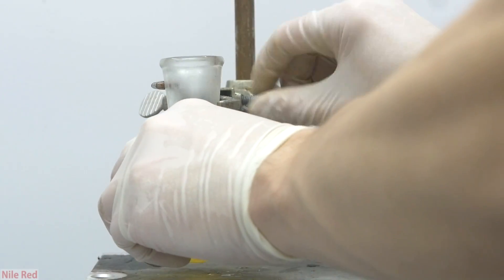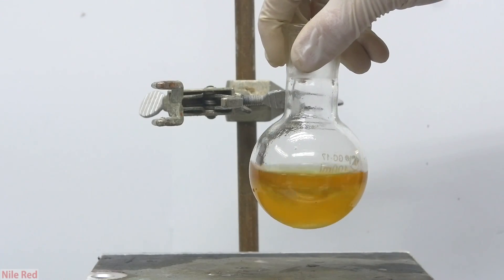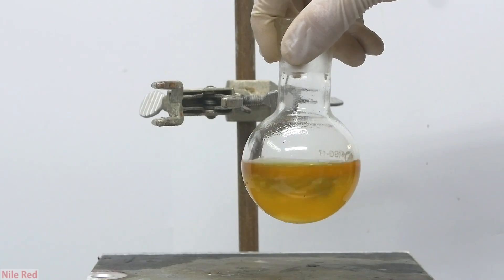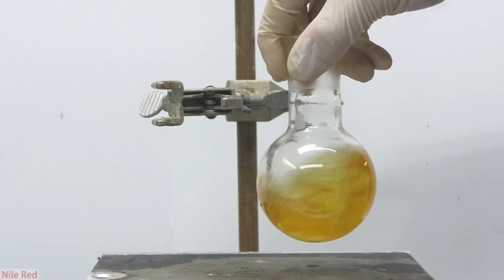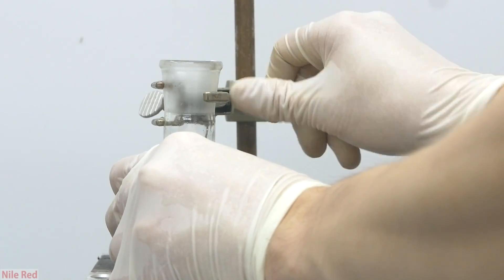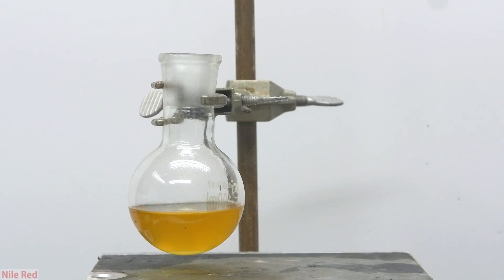I really do want to mention how horrible these steps are, and just how terrible it is to work with acrolein without a proper fume hood. Even with decent ventilation, it will burn your eyes pretty quickly, and respirators don't stop it, so don't think you're immune if you wear one. On top of burning your eyes and your respiratory tract, it also smells terrible, so it's just altogether a horrible thing to work with.